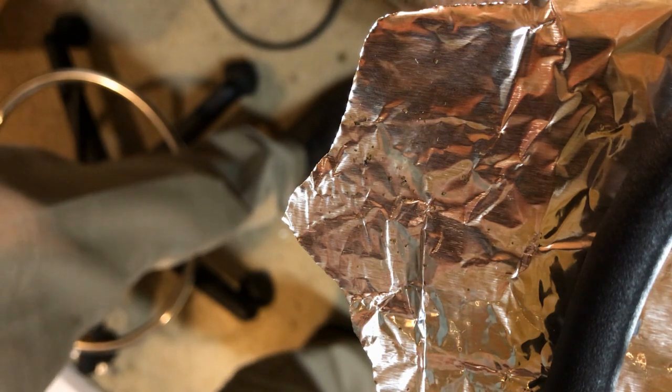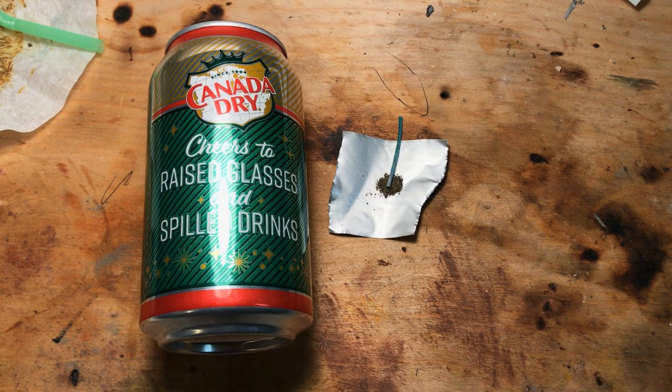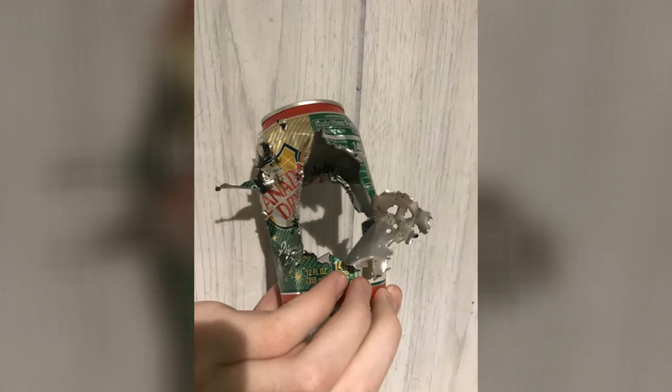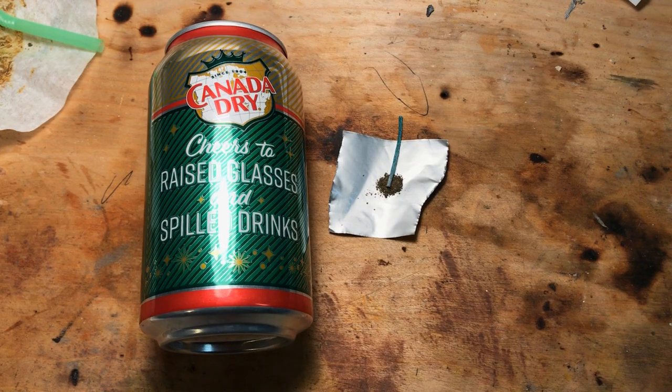That's very useful for a primary. Now for the can test, I'm just going to be using 50 milligrams of the copper salt — I don't have much more than that on hand right now since this video wasn't really planned to be on Copper 1 Nitro Tetrazole. In the future I might put out a video using maybe 250 milligrams. I do have a good picture of the results of using 250 milligrams of the silver salt of Nitro Tetrazole on a can. I expect the copper salt to perform similarly.